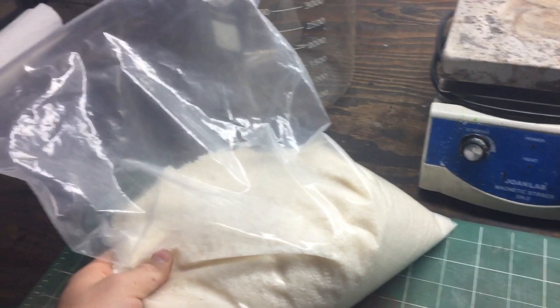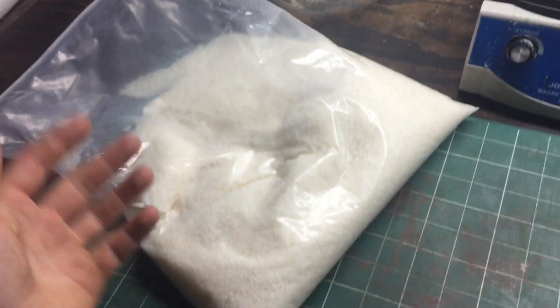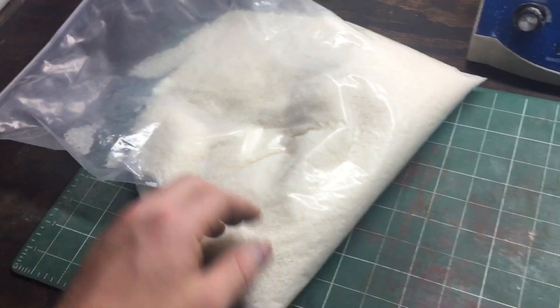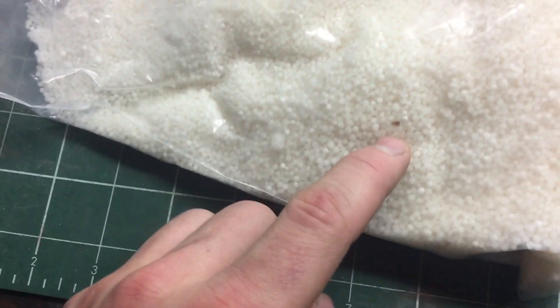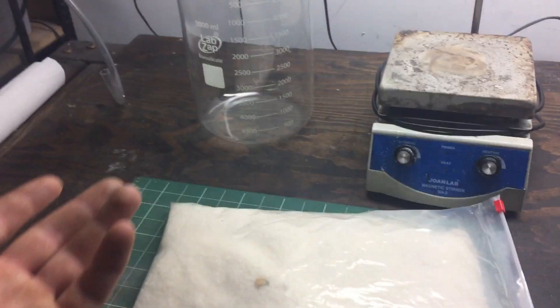Here I've got five pounds of ammonium nitrate that I'll be using as my precursor chemical to making nitric acid through a reaction I'll show later. I'm not very confident in the purity exactly because there's little particulate matter, and when I got it I found a piece of corn. I don't know why there's pieces of corn in my ammonium nitrate — it is obviously a fertilizer — but it's disheartening. So I'm going to recrystallize all this, and I probably was going to end up doing this anyway because it's in a prilled, little beaded form and it's ugly.